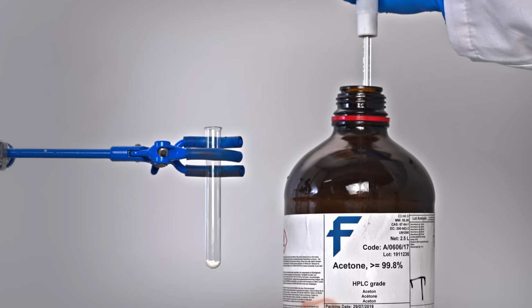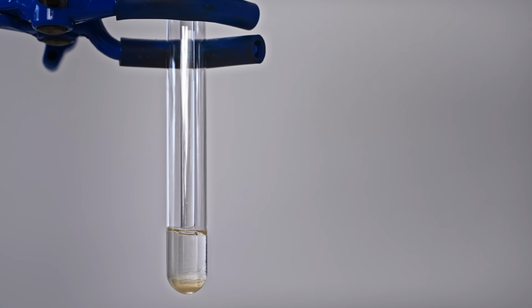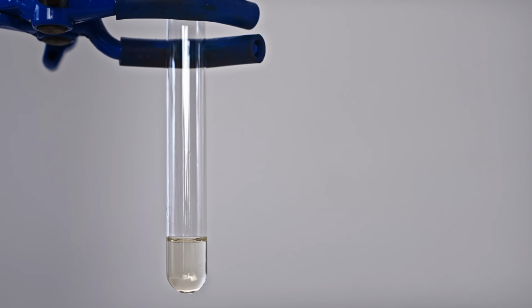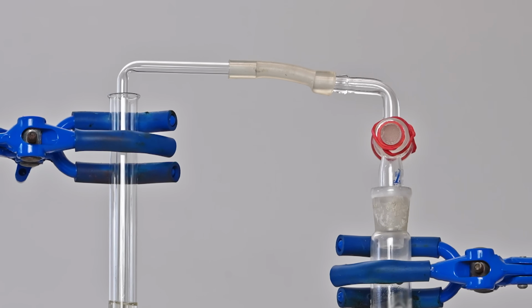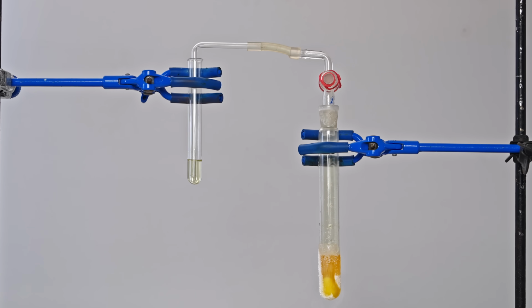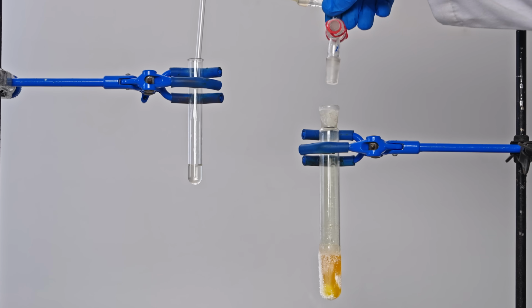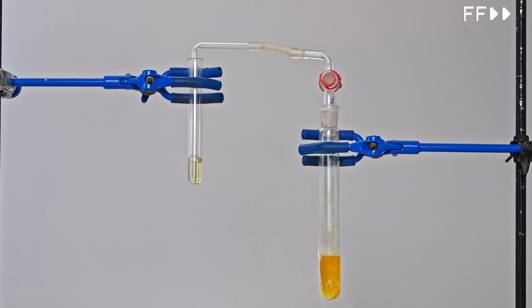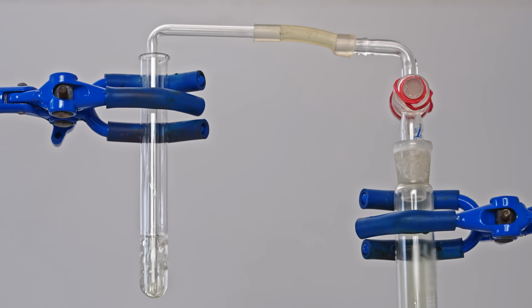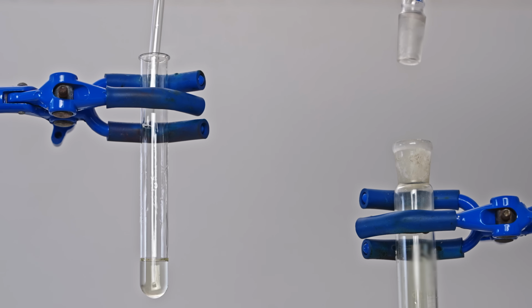So now I want to show you the next interesting reaction. I've dissolved a small amount of diiodoacetylene in acetone, resulting in a clear solution that remains stable when exposed to air. Next I'm going to pass chlorine gas into this solution and see what happens. The solution remains clear and stable for now, while the gas is bubbling through, but once I stop the flow of chlorine, it quickly begins to turn yellow. However, as soon as I restart the flow of chlorine into the mixture, you can see that the solution quickly becomes perfectly clear again, but the moment I stop the flow, it turns yellow again.